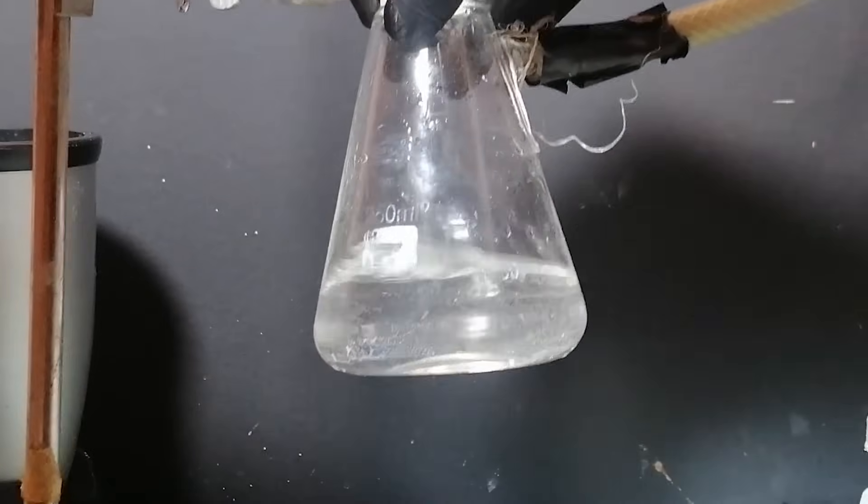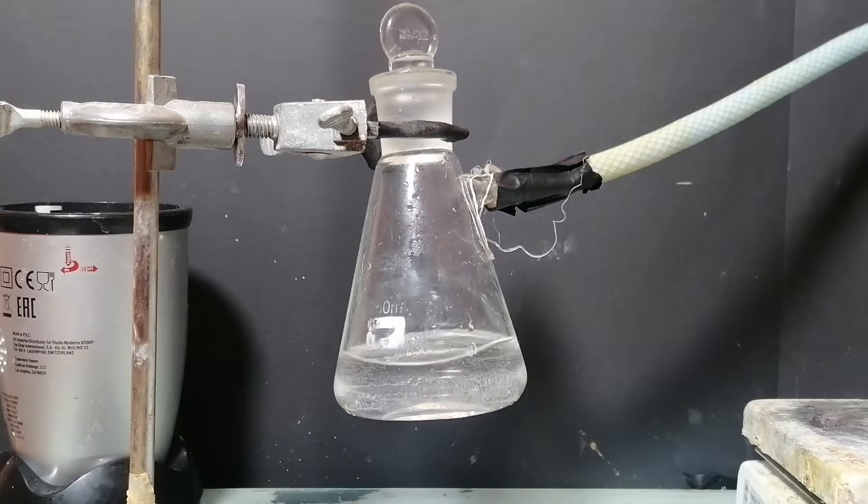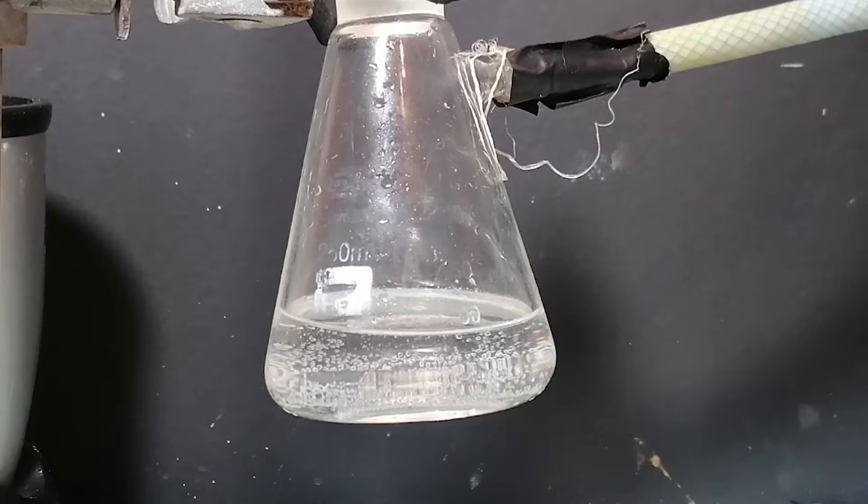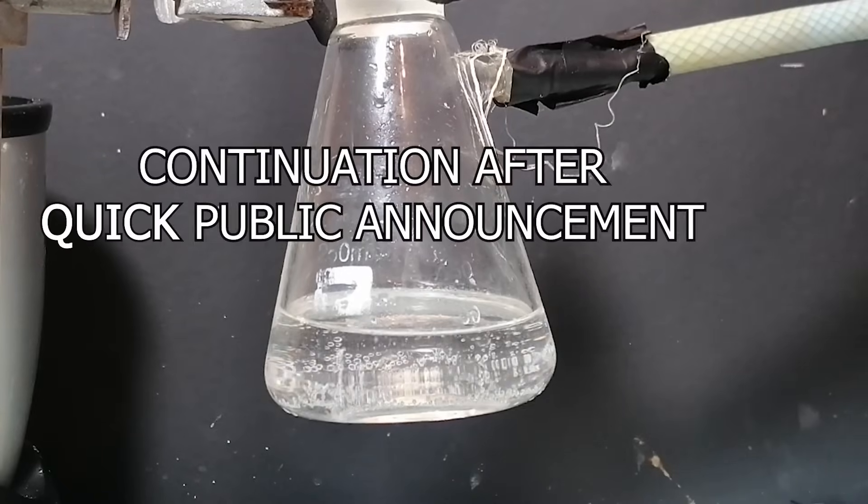Well, at that time, I was pretty freaking confused. Mostly because nothing was really happening. But after a while, finally some bubbles started foaming, and that was the laughing gas.